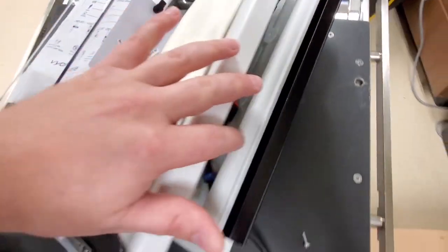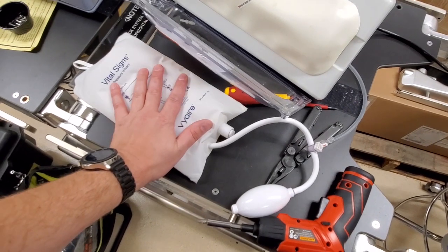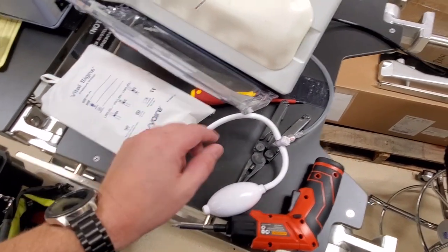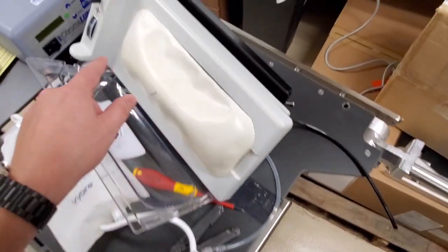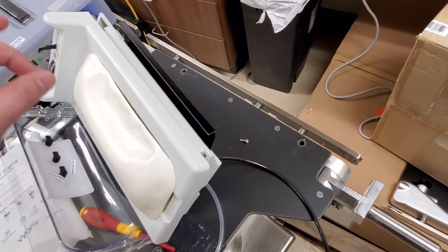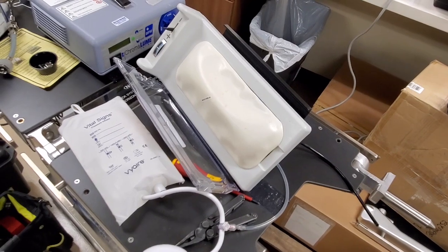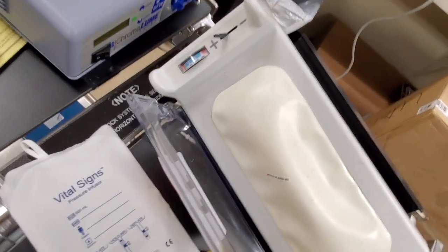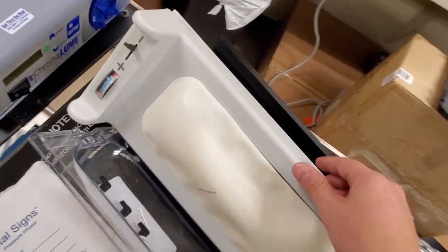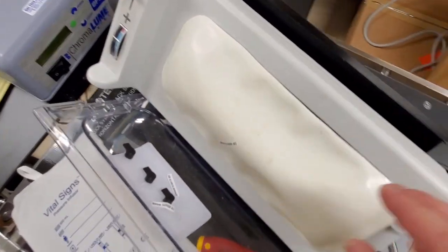So what we're going to do is with my digital manometer I'll inflate this guy to 300 or let's say 250 millimeters of mercury. I'll close it off so that we keep it at 200 and then I'll adjust the scale on that tiny little screw on the back until it matches up to the 200. And that's how we set it and calibrate it. So when you slide this guy over to the minus it then goes over here and vents it to atmosphere relieving the pressure.